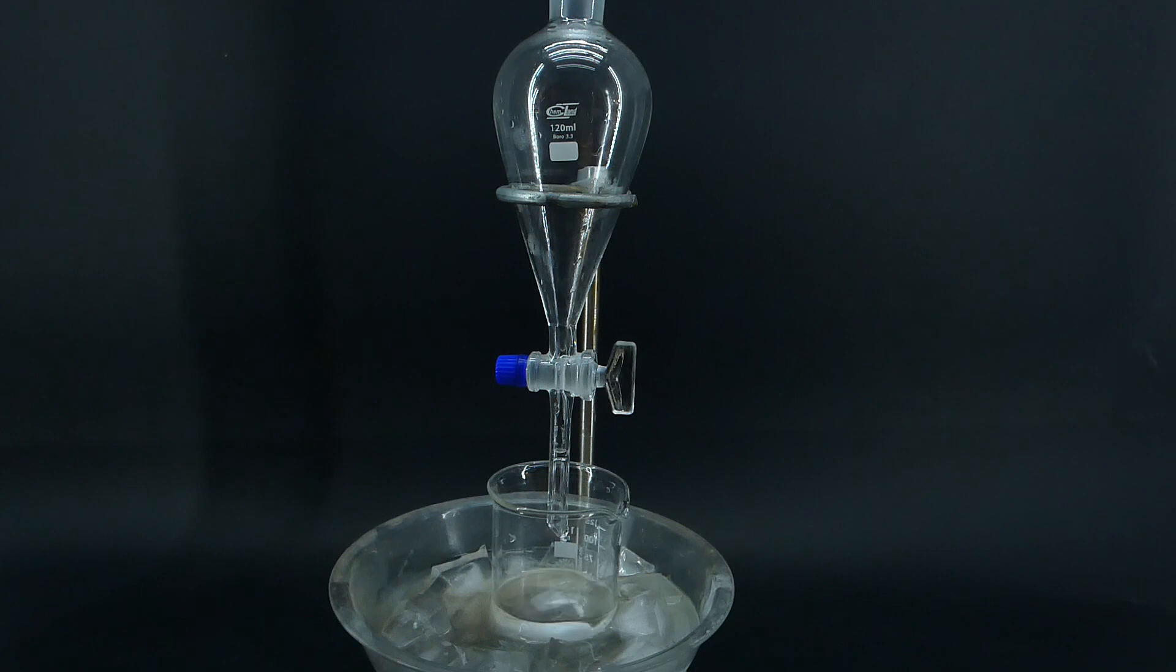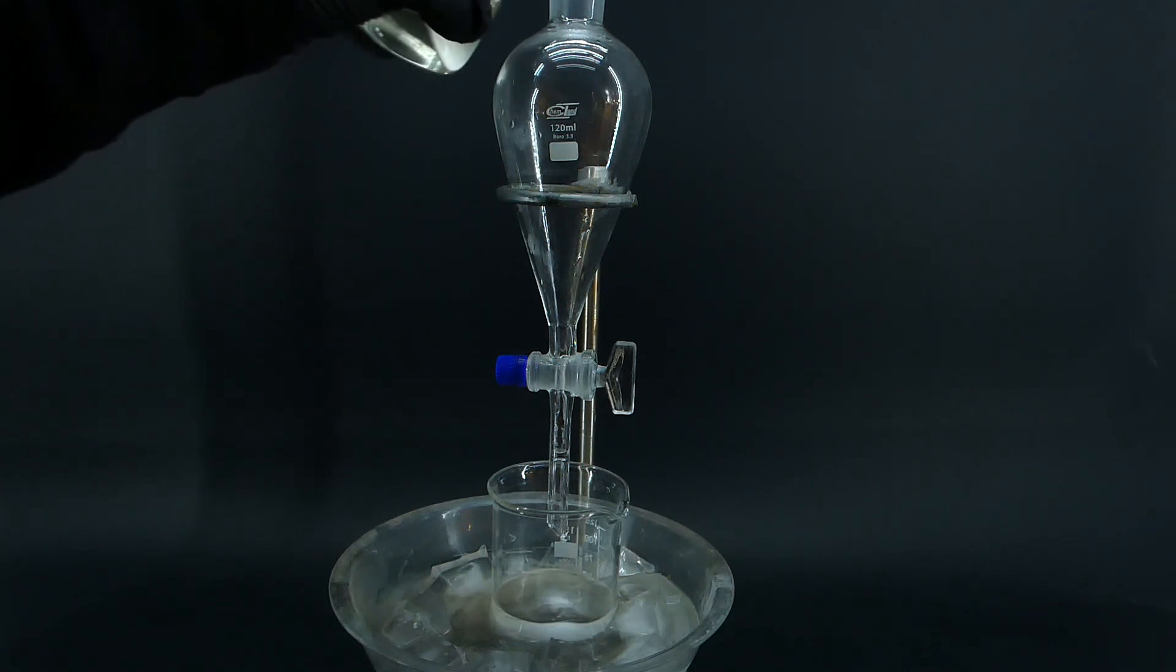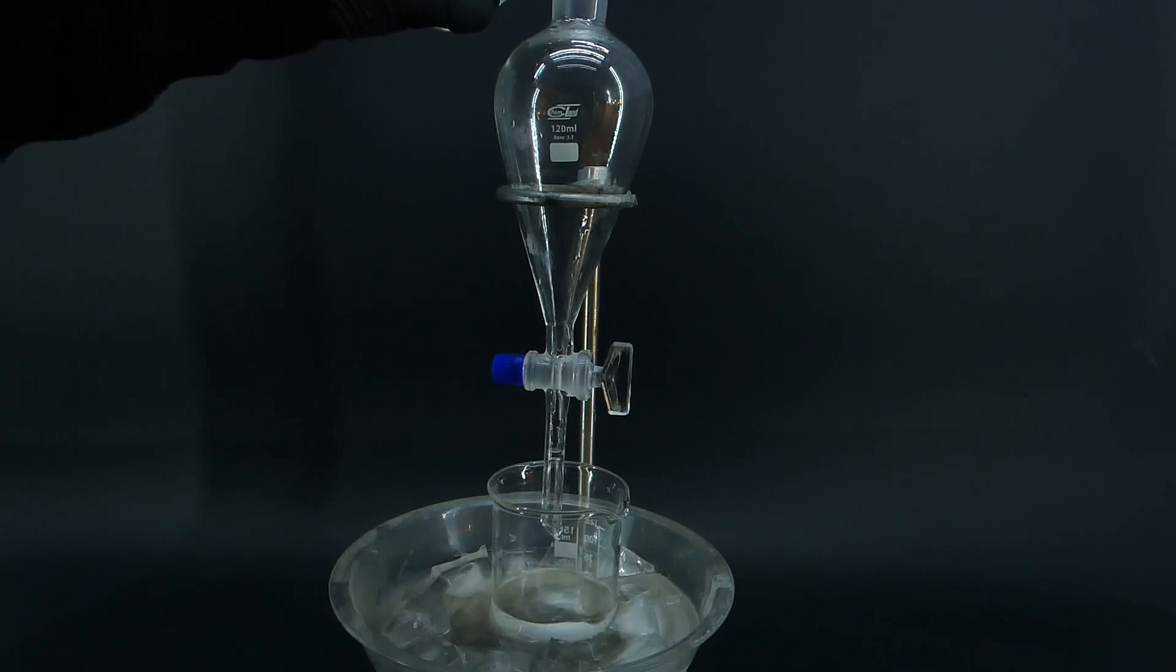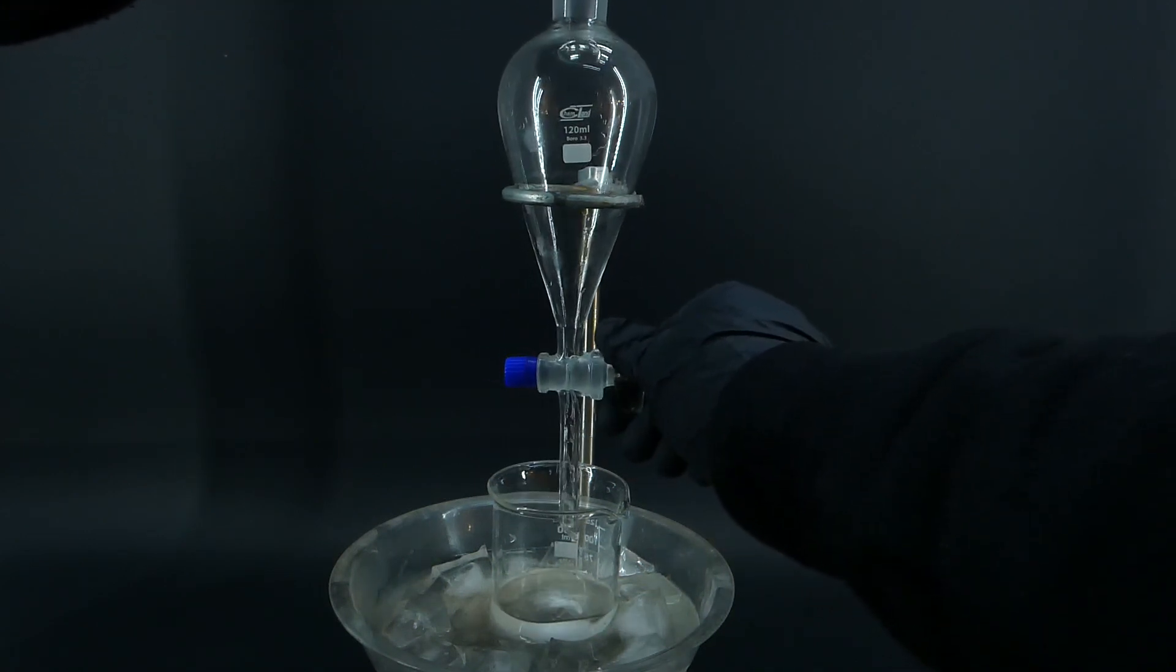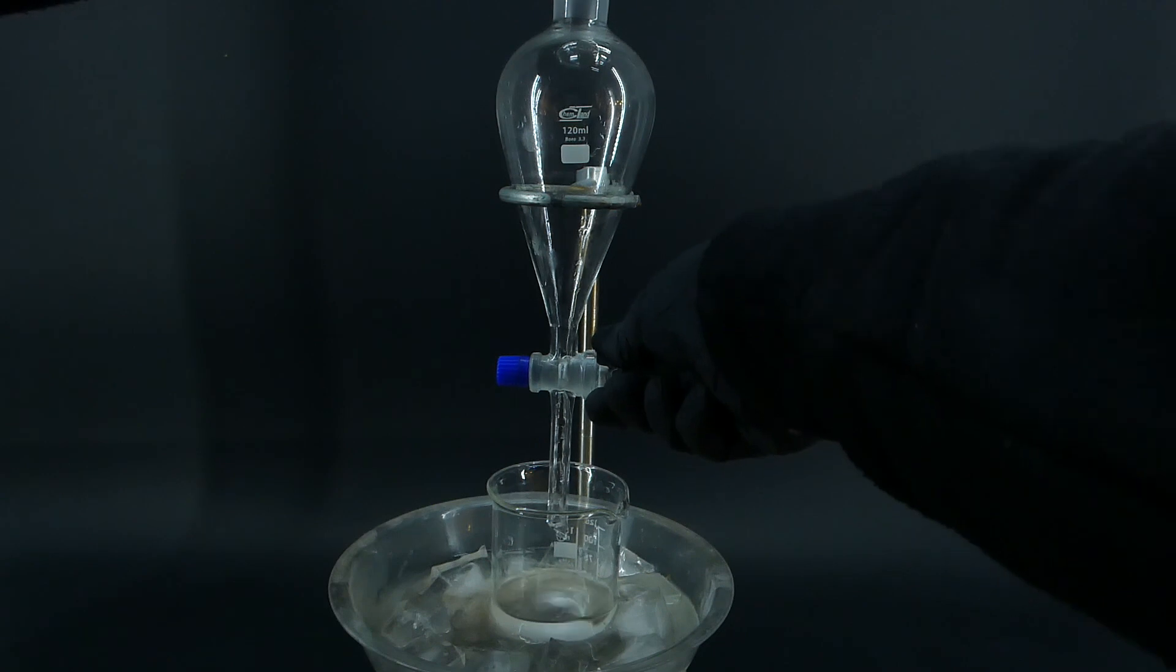When the solution was ready, I transferred it into a separatory funnel above the alcohol acid mixture. I, of course, forgot to close the valve, and some of the sodium nitrite solution managed to escape, but in the end, everything was okay.